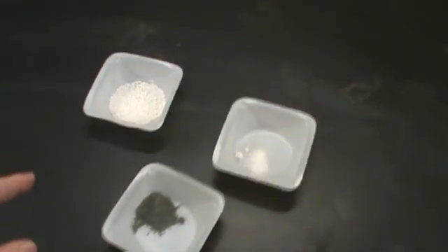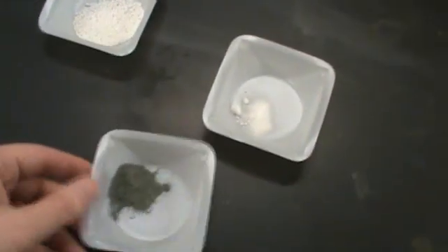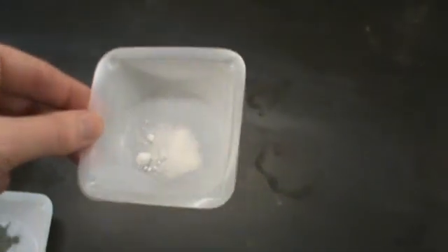So this is homemade fireworks and I have three chemicals here. I have ammonium nitrate, I have zinc dust, and this is ammonium chloride.